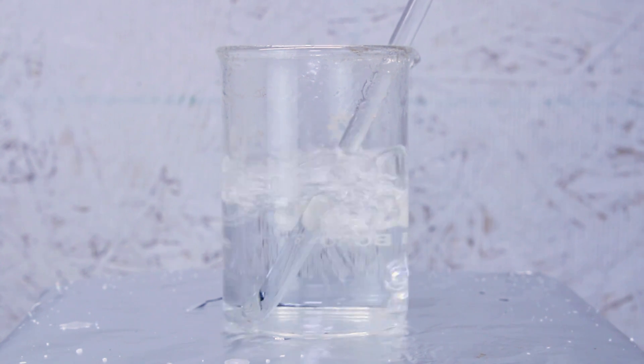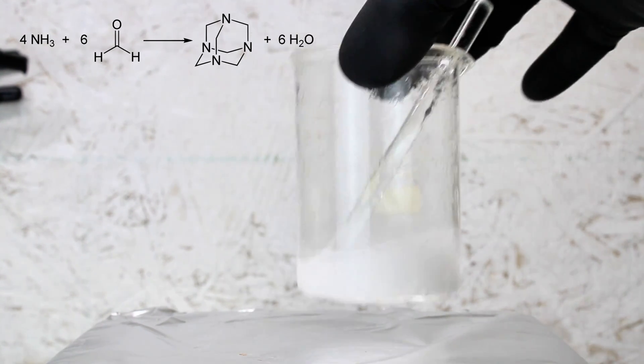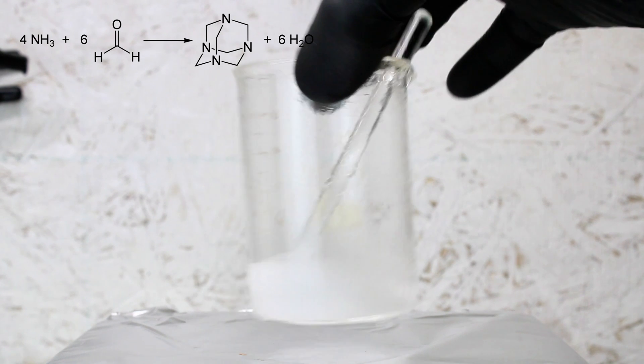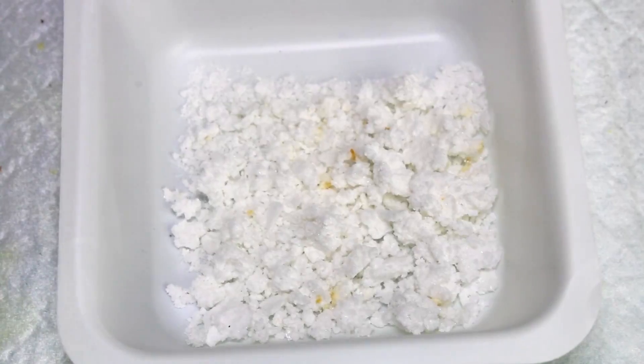Now the net reaction here is four ammonia molecules and six formaldehyde molecules forming one hexamine molecule and six molecules of water. However this reaction obviously doesn't take place in one step, and the formation of hexamine is actually a series of different rearrangements.